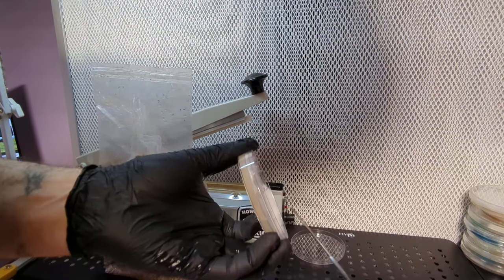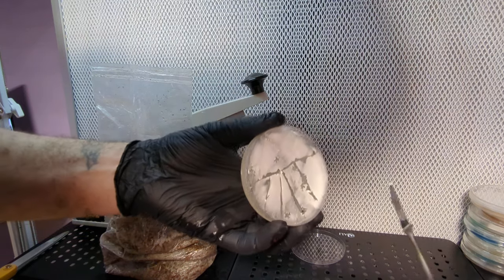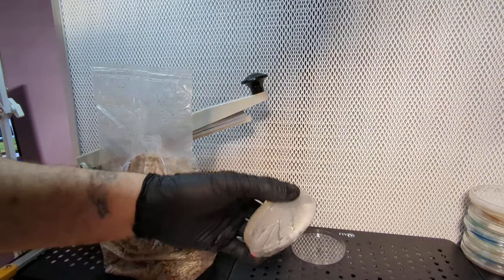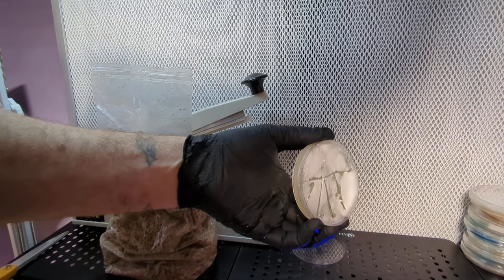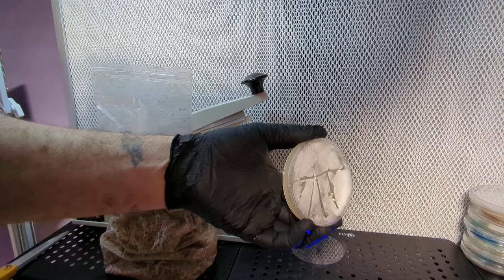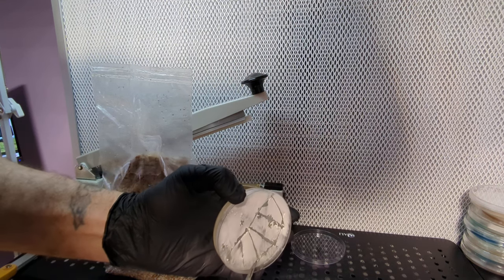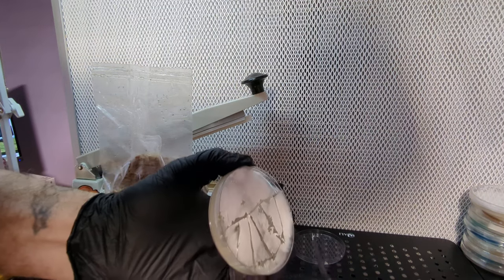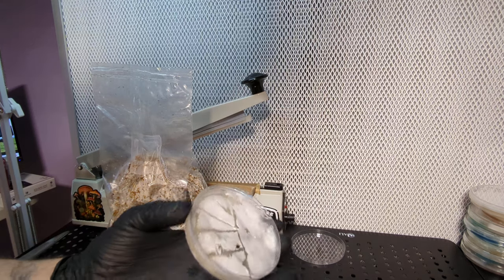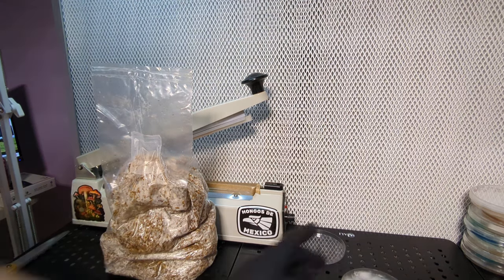I'll re-sterilize, get my blade good and hot and clean, and then remove this outer area so it won't go with us. Just go around the edge and leave that perimeter on there. That way when you flake your flakes off, the stuff around the edge that might have had some bacteria on it will stay where it is. Now I'm going to take a flake out - but first I've got to open my bag. I've got everything sanitized - open my bag up.